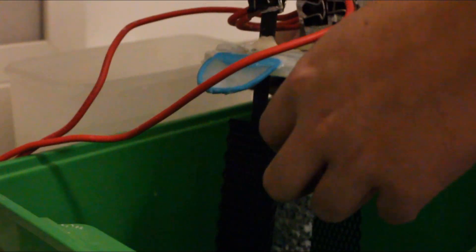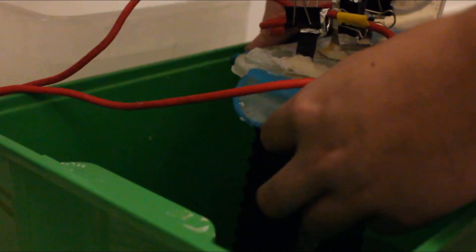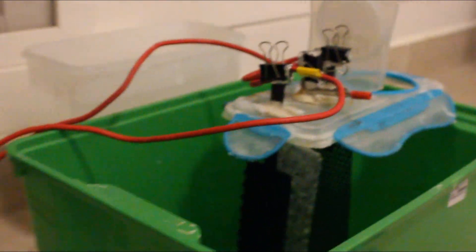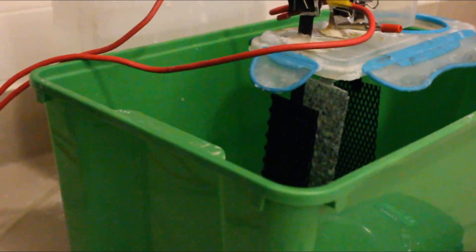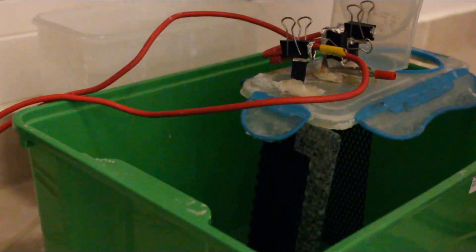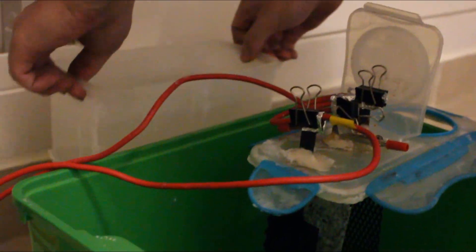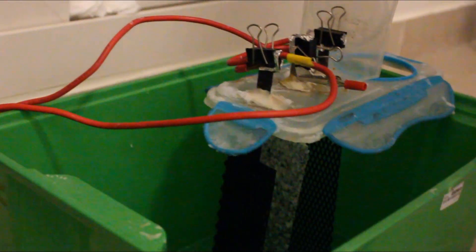So as you can see, electrodes are okay. Cathode is nice and white. So you want to just gently lay down these things. Then you want to unplug everything. Now after doing so, as you can see in a pH controlled cell, you can look at the water and it is not yellow. Like if this were a non pH controlled cell, that water would be super yellow. But in this case it's clear.